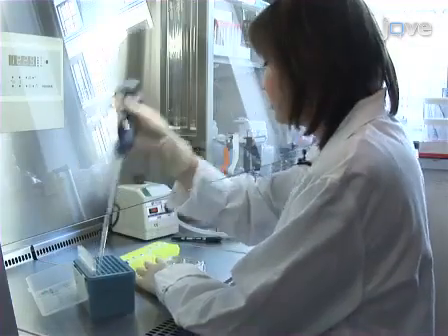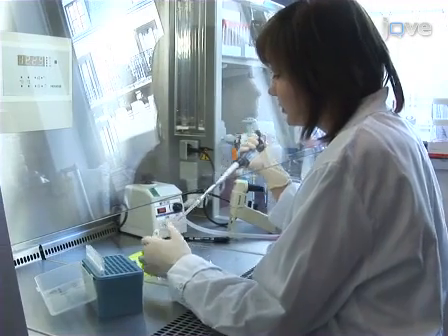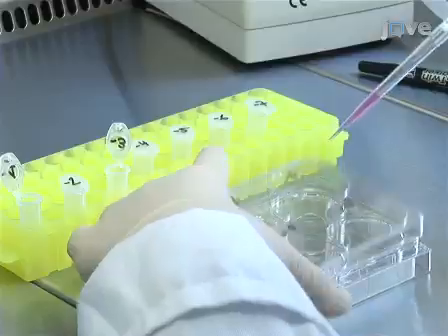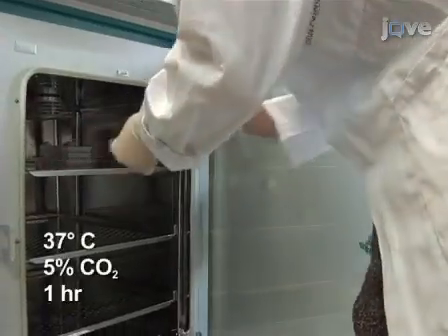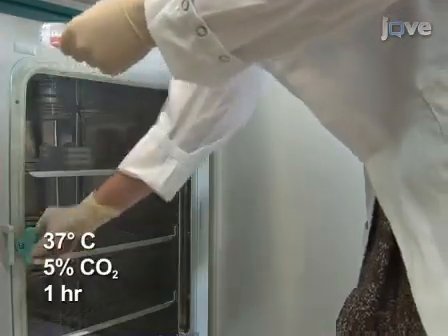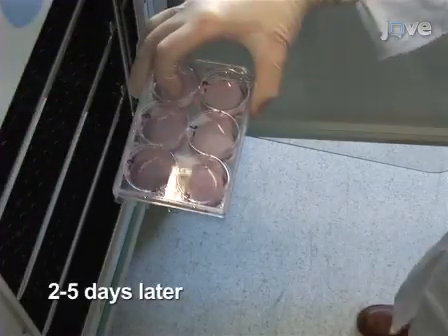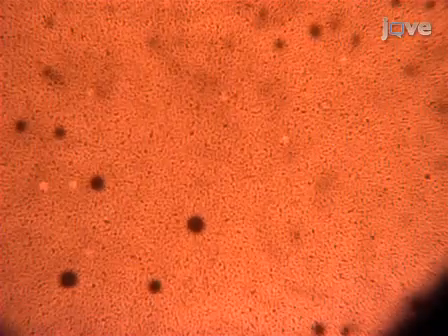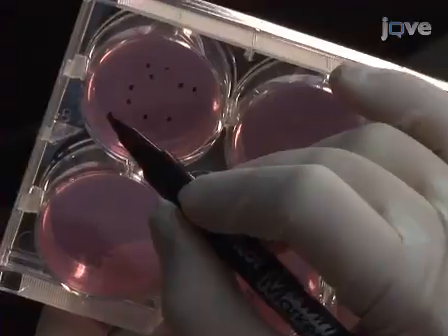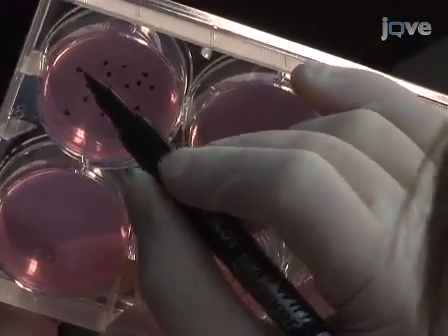To isolate the identified mutant, prepare serial dilutions of the mutagen-resistant sample and add them to cell monolayers on 6-well plates for a plaque assay. Following an incubation of 1 hour at 37 degrees Celsius and 5% carbon dioxide, add an agarose overlay. 2 to 5 days after infection, plaques should be clearly visible. Ideally, one of the plates will produce between 10 and 50 well-separated plaques. Mark the location of plaques on the plate with a dot using a marker.